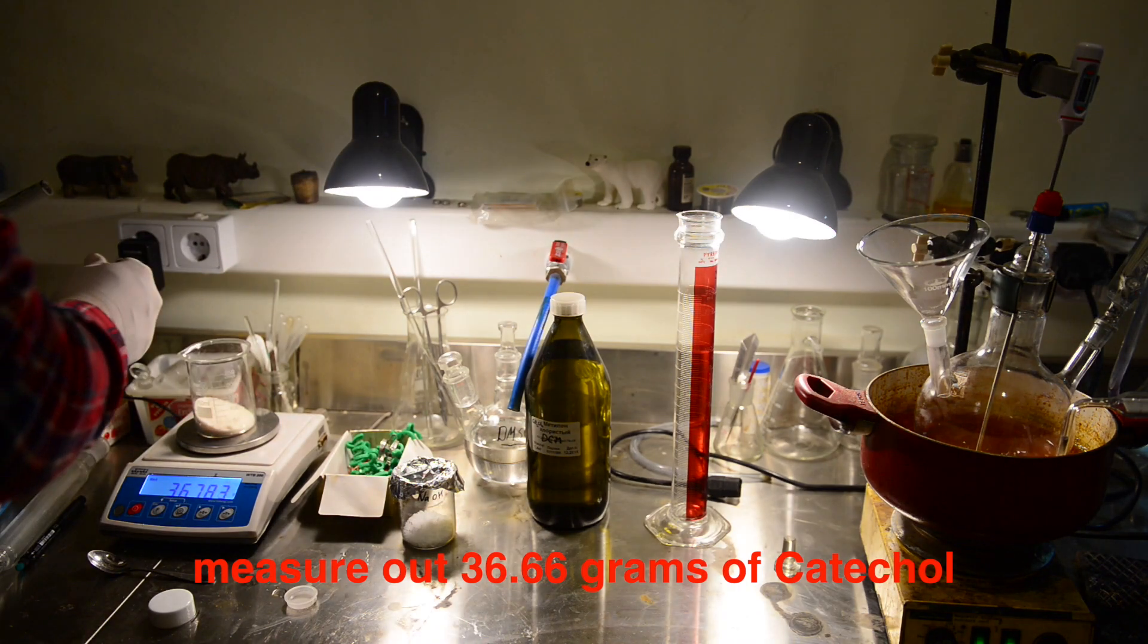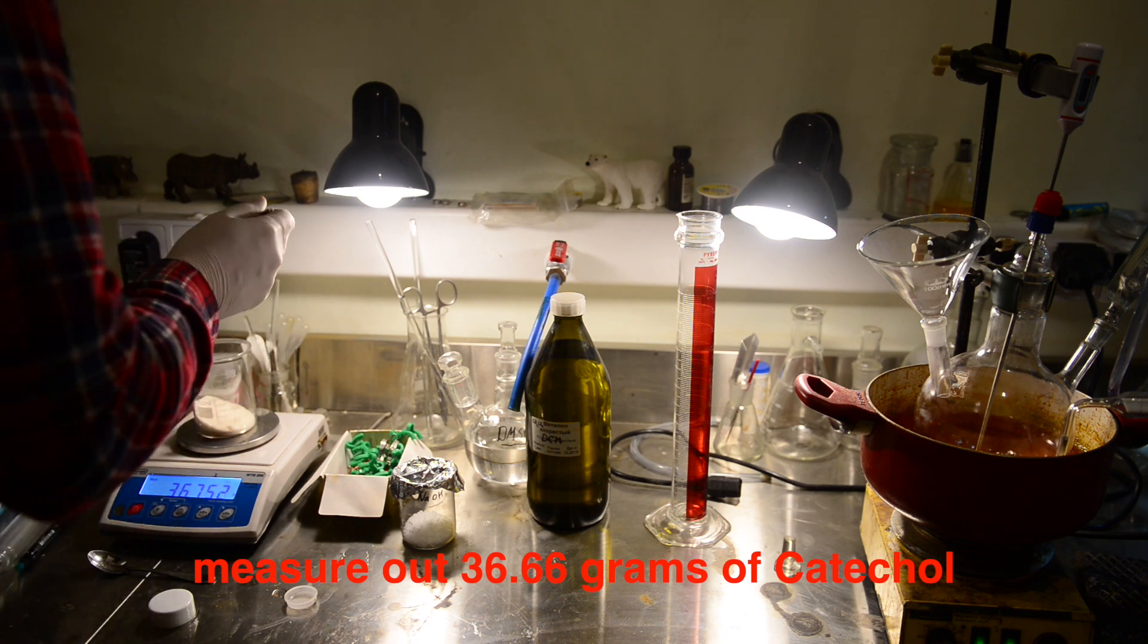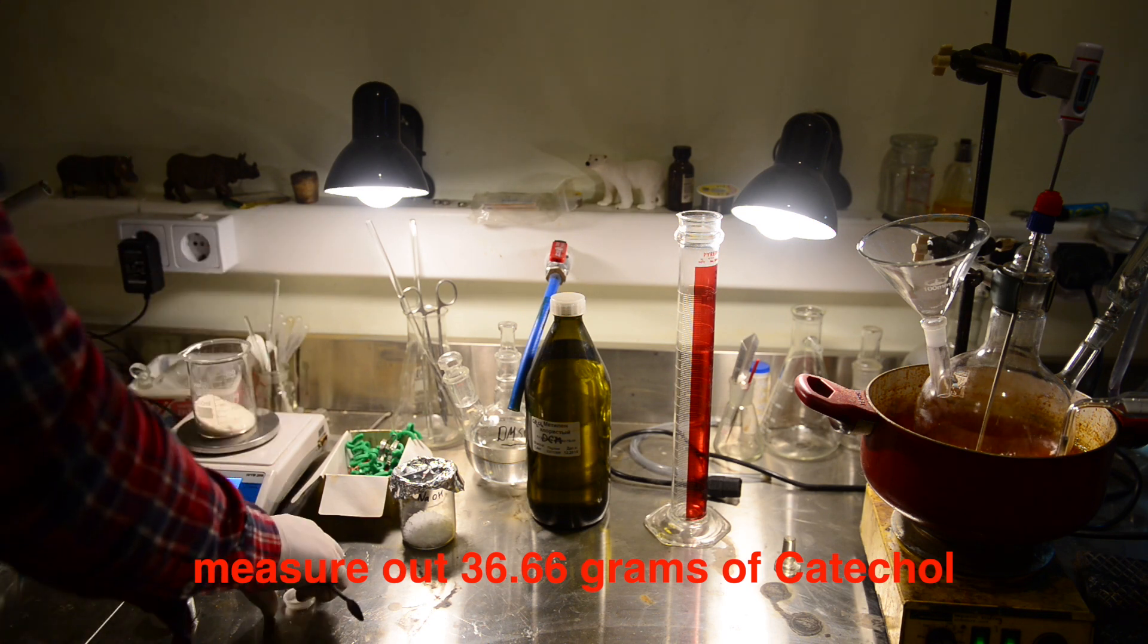We weighed out 36.66 grams of catechol and 28.33 grams of sodium hydroxide.